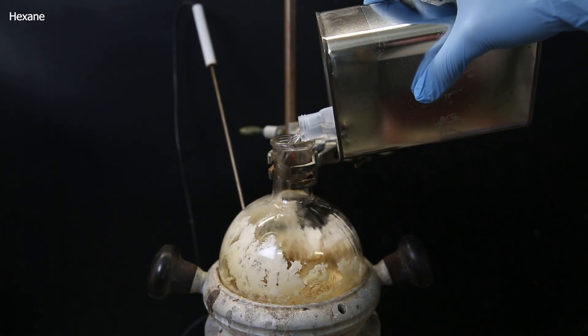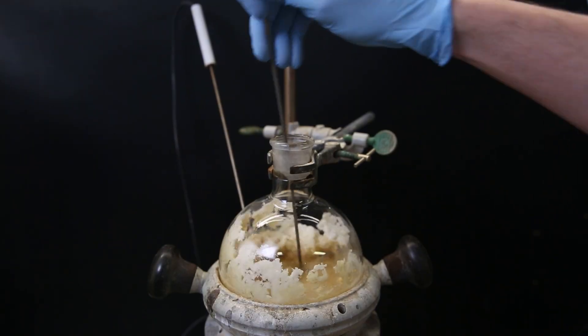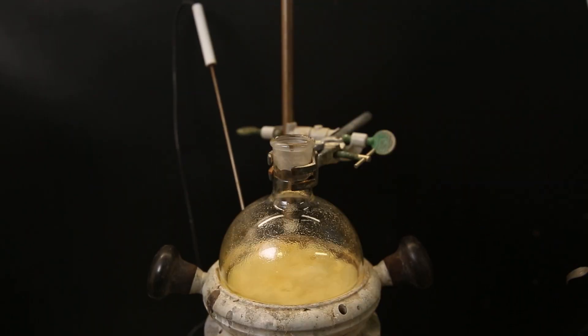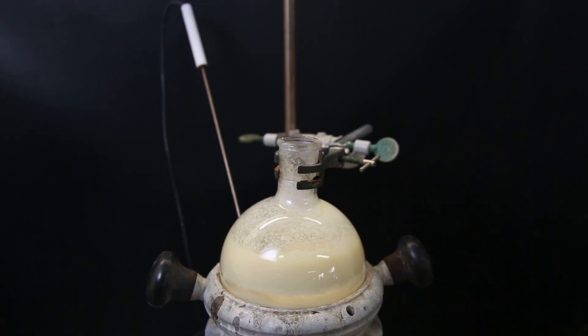To clean it up, I add some of the solvent hexane and break it up with a spatula. Then I let it stir overnight to break up the larger pieces and properly allow the solvent to take up the impurities.